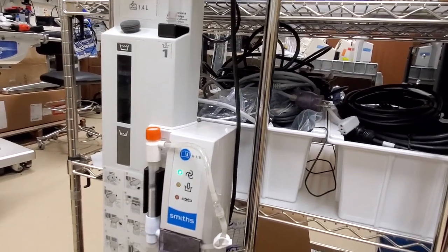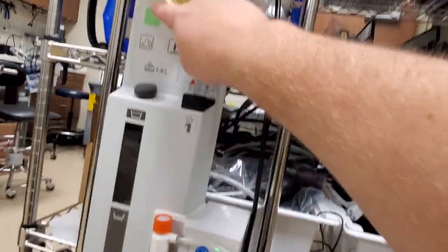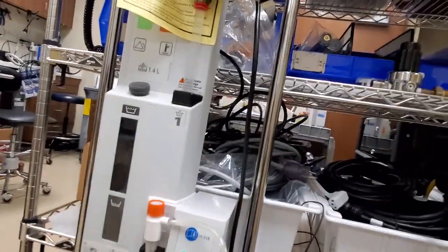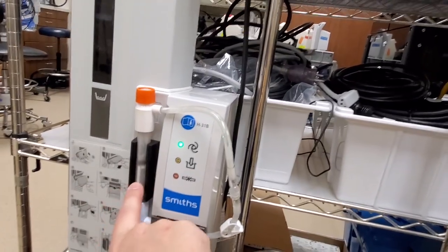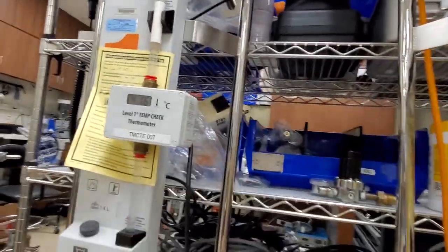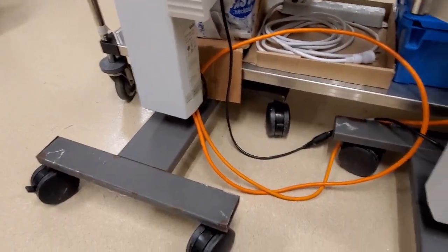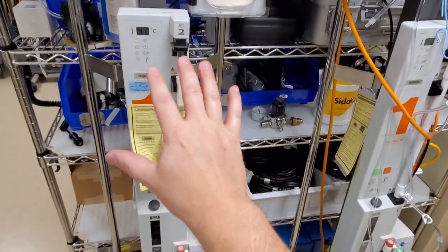So if you ever have a rookie that's working on these, one of the fun things to tell them to do is to hit the green button and then when he says it's not doing anything, tell them to press the micro switch right here and the micro switch right here. Tell them to just put one hand on one and one hand on the other and push in those buttons, to which it'll instantly shoot water all over the room. It's kind of funny to do. But anyway, so that is the functionality. That is part of the testing of one of these guys.